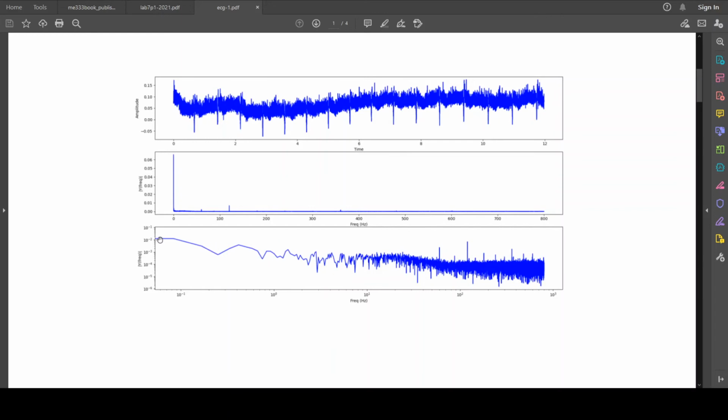There's also some kind of mean. So we want to remove this mean with a high pass filter. So we'll set our high pass somewhere around 1 hertz. And then our heartbeat is definitely not going faster than 10 hertz. So we'll set a low pass initially at like 10 hertz, and we'll try to keep only this area. And we see that it's in the millivolt range. So we'll try to have a gain of, let's start with a gain of 100 and go from there.